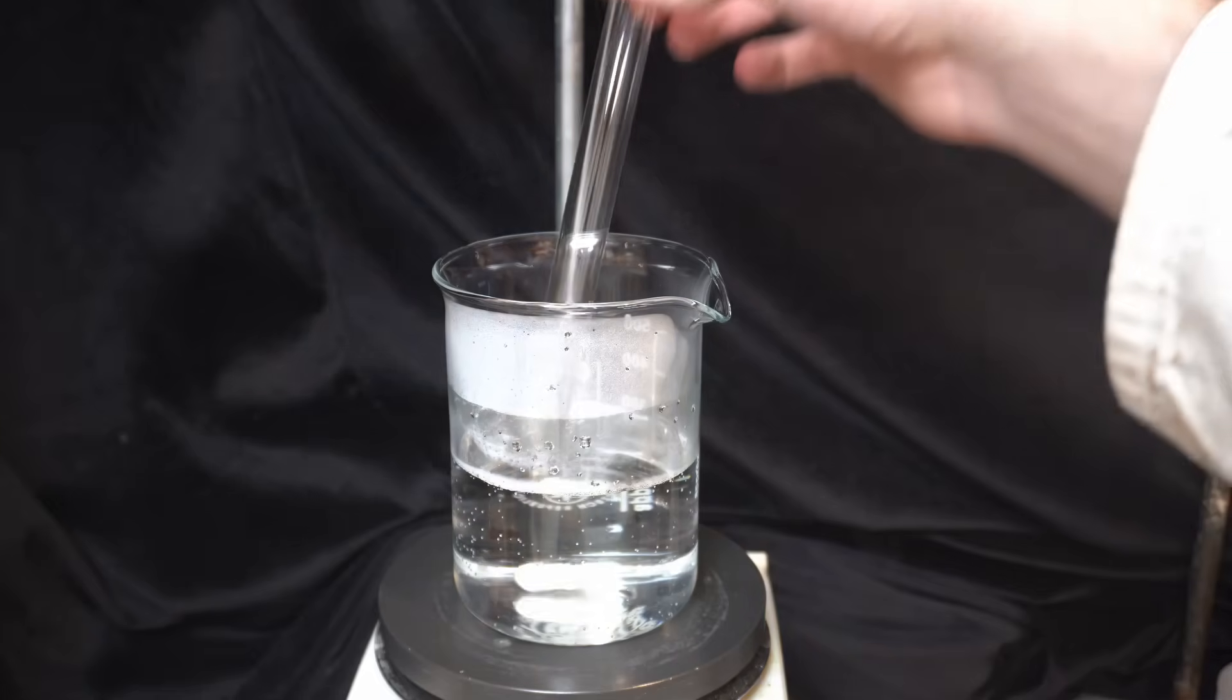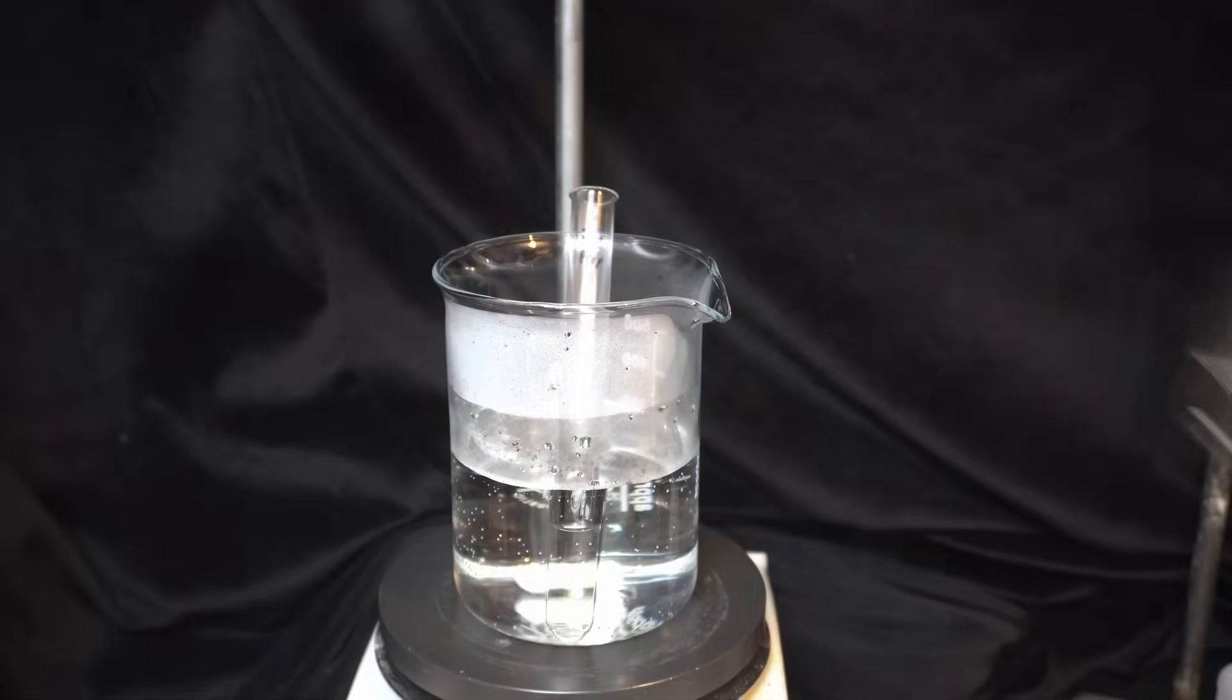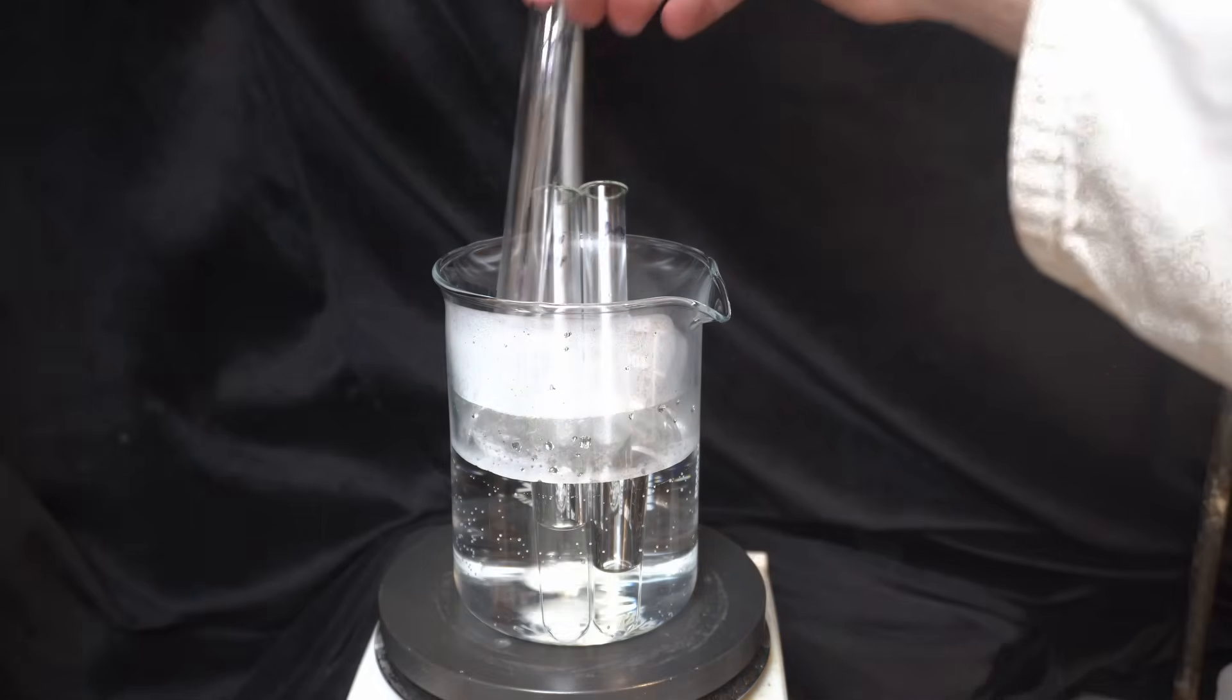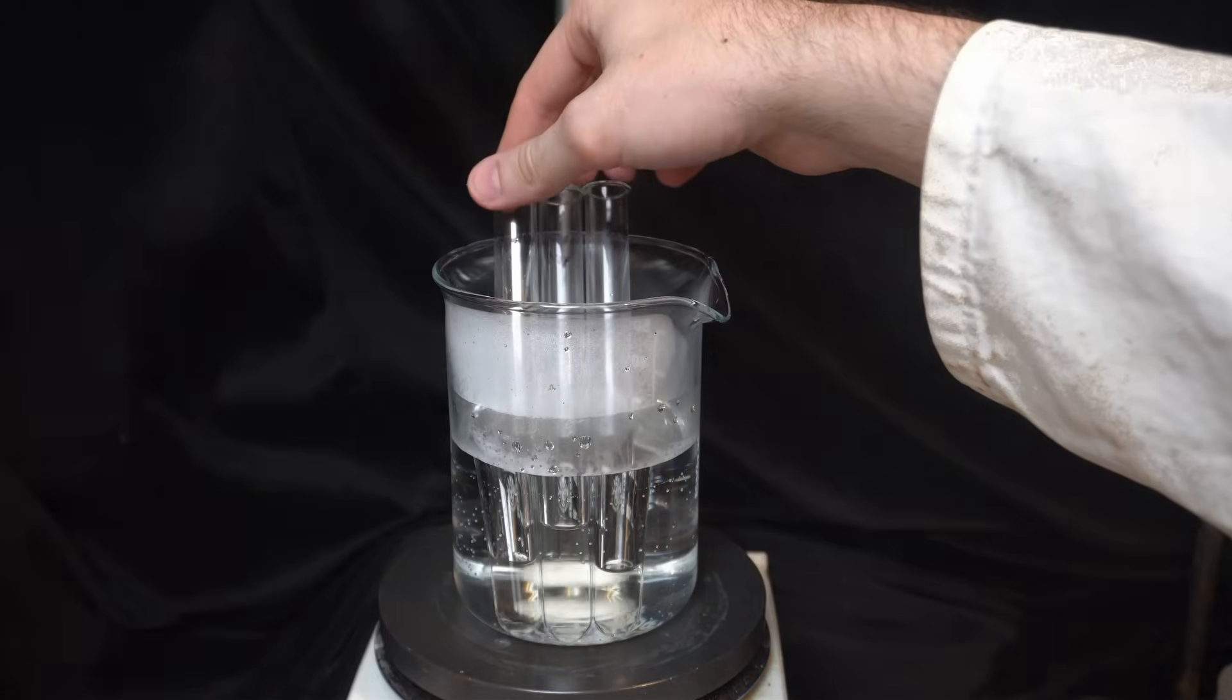To speed up the reaction, I will also heat it in a warm water bath. And that's basically it. Making esters with acetic anhydride is extremely convenient. Acetic anhydride is a good electrophile, and the alcohol will very easily react with one of the carbonyls.